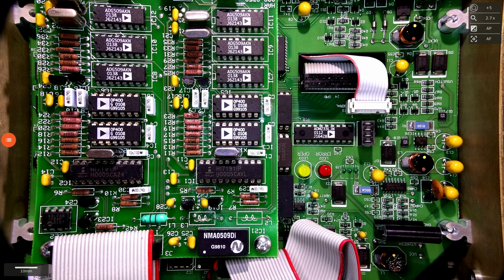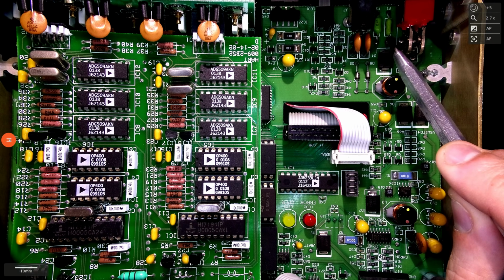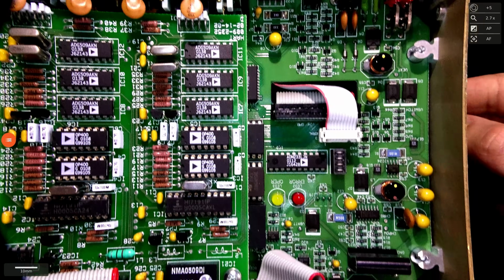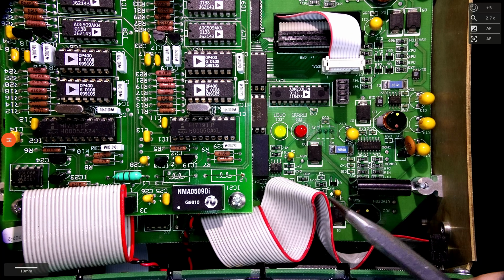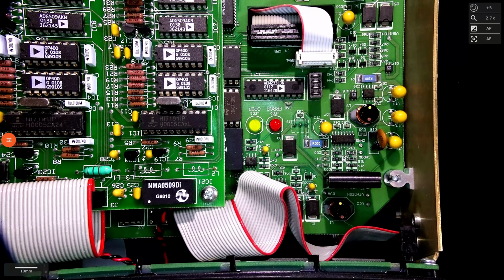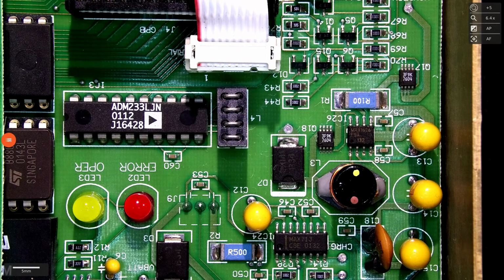So let's see what we have. If I look here on the top, this is the fuse that I replaced right over there. That's where the power is coming in. This is the switch. I don't see anything in there for DC-DC converters. And over here, I see one right over here. This is the one that was getting hot when I put my finger on it when I was turning it on. And there's one down here. So let's zoom in a little bit here, see what kind of DC-DC converter we're dealing with here. This is a Max 1626.